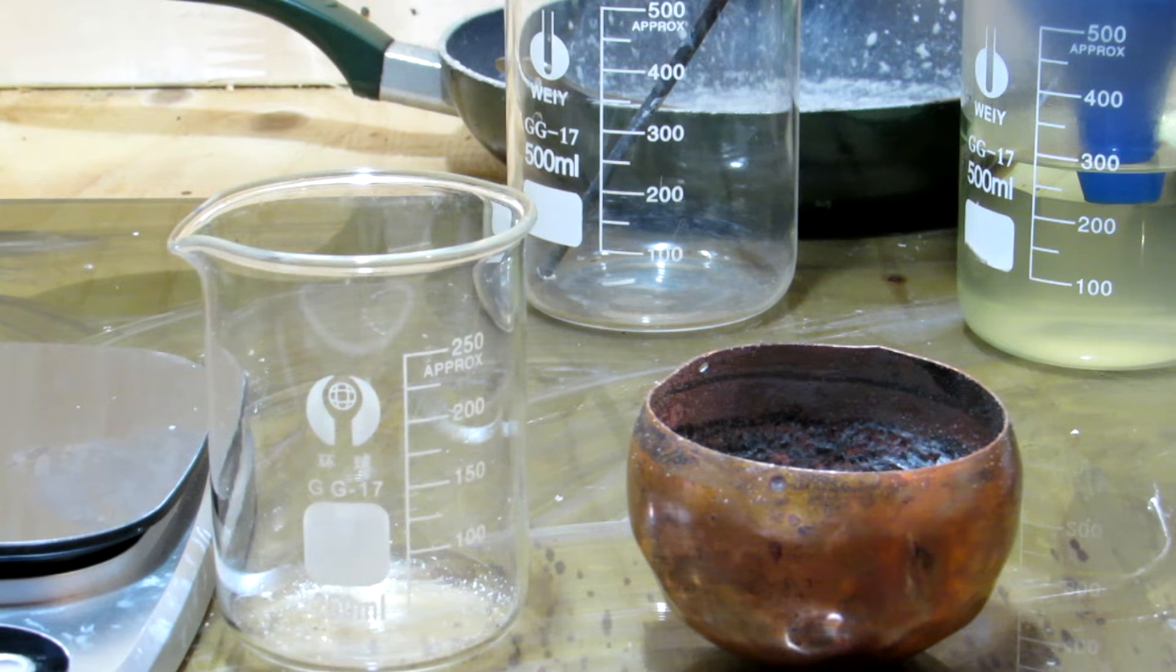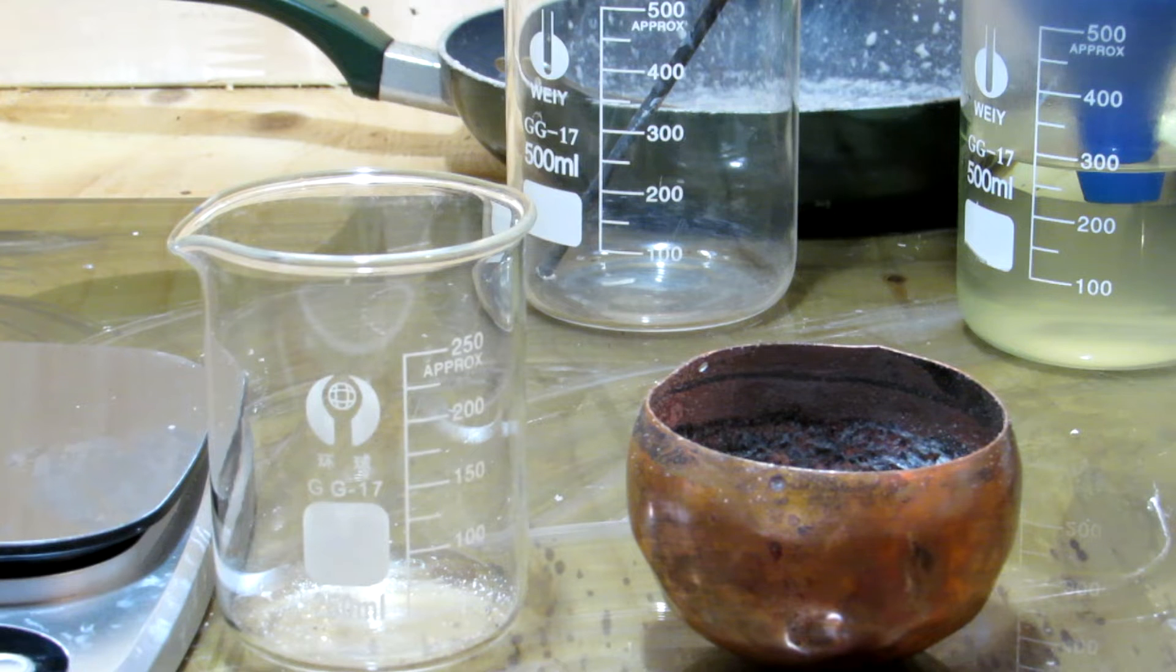One downside of copper is that it will likely contaminate the product just because it seems to slightly react with the copper as the copper oxidizes, but this isn't a big issue because we're just going to be using the sodium hexametaphosphate to produce some white phosphorus.